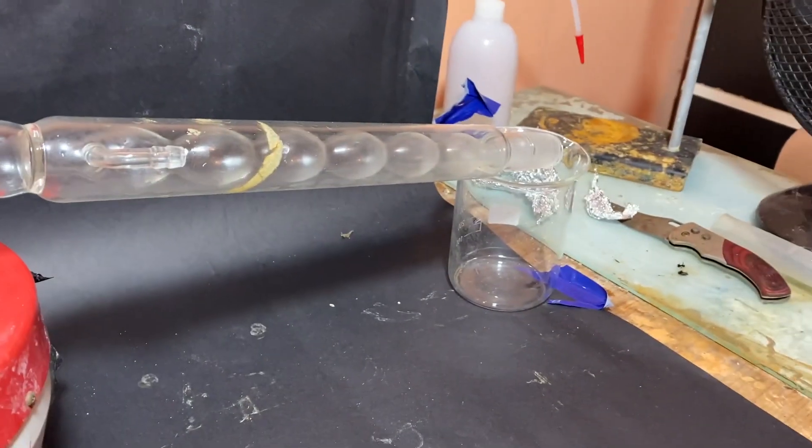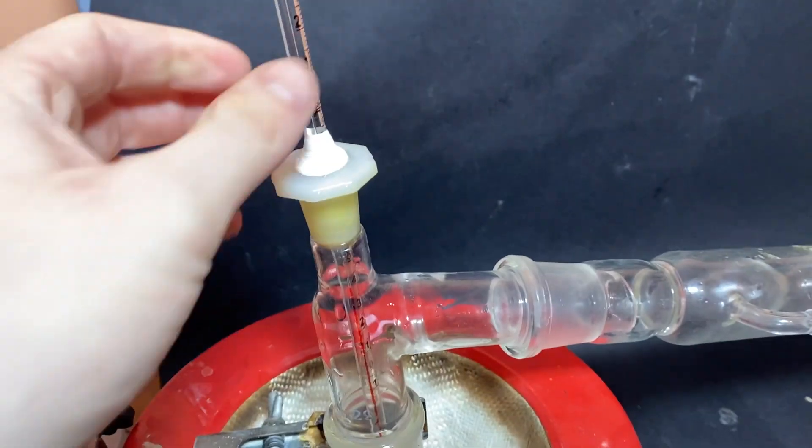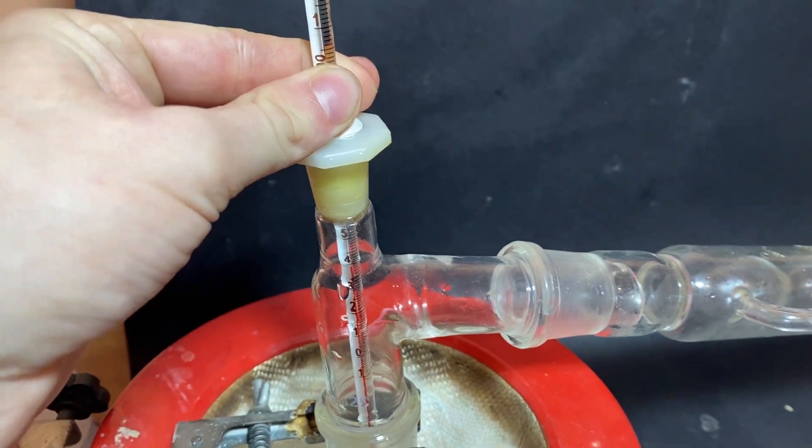I set up a quick distillation apparatus. Yes, this is a really bad thermometer head. I've planned for it to go into a three-way adapter only, but I guess I went a little bit too far.